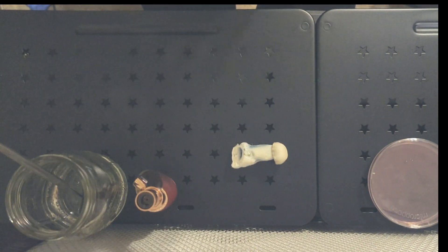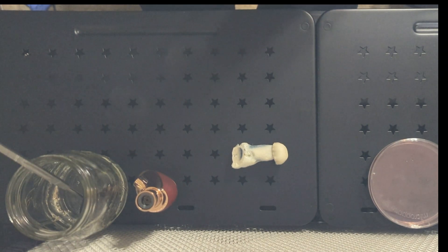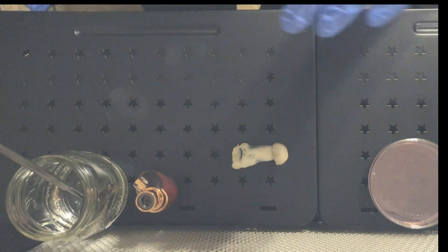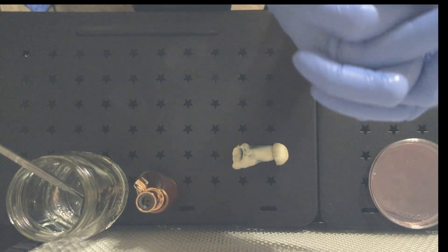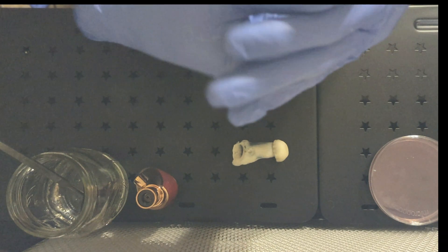What's going on everybody, I'll be cloning a mushroom from a tub. But before we start, make sure you're doing this in a flow hood, in front of an FFU (fan filter unit), or in a still air box, and definitely not out in the open air. Make sure your hands are washed and sanitized, put some clean gloves on, and sanitize them with 70% ISO.